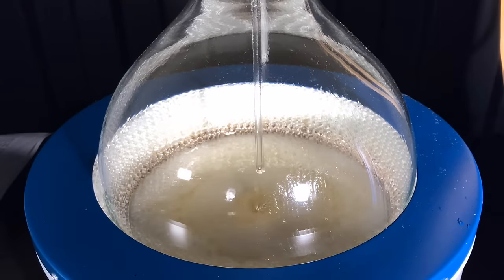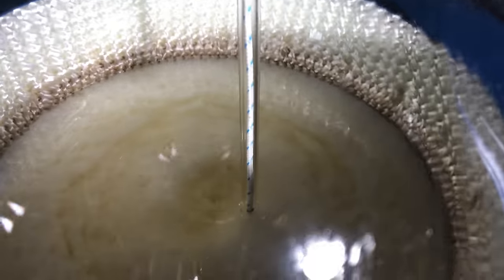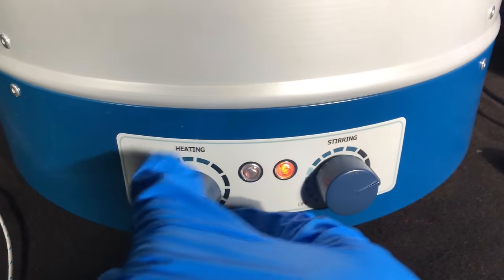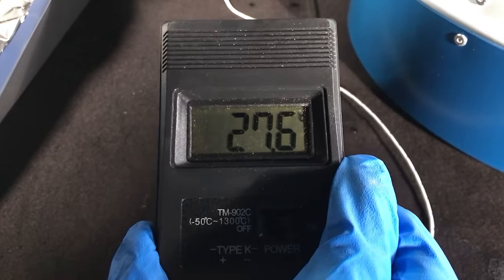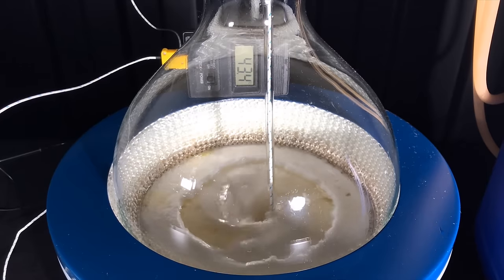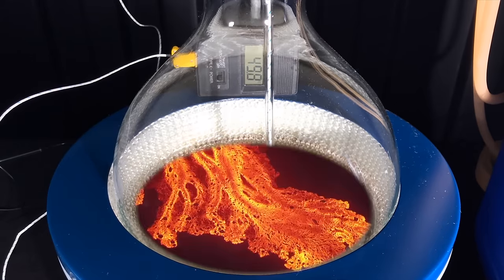What ended up happening was that an enormous amount of white sludge crashed out after only three minutes. This is our product. For driving the reaction to completion, you turn on the heating mantle, heat to 53 degrees C to create a tornado of unbelievable pain.